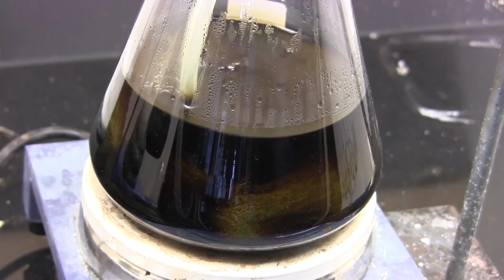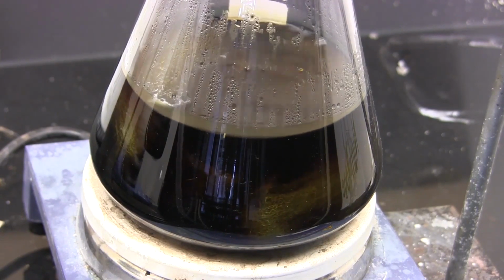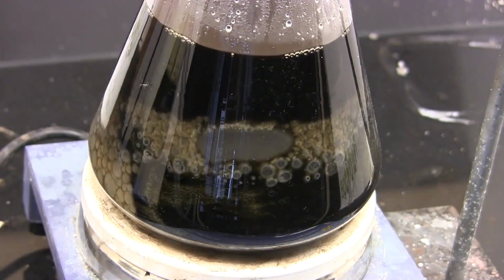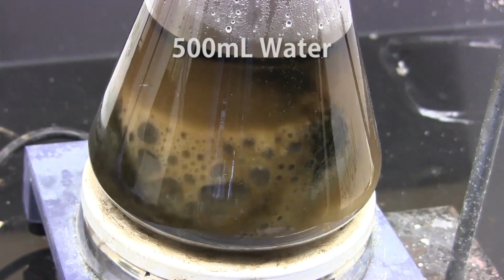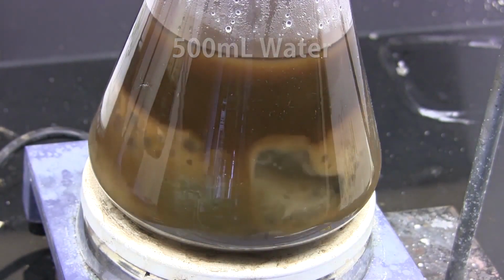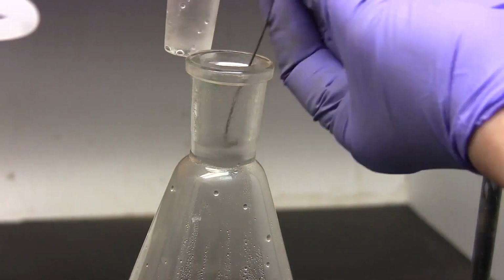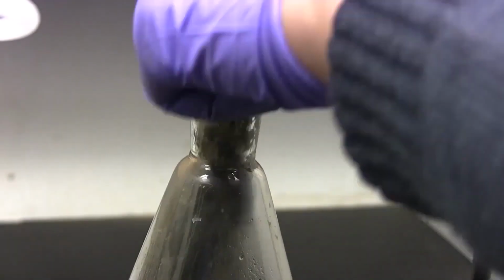Okay, all the chlorine has been added. Now we just let the mixture stir for an hour to complete the reaction, and then we let it cool completely to room temperature. Here we are after everything is at room temperature. Now we add 500 milliliters of water to dissolve the iron chlorides, any soluble impurities, as well as wash out any residual hydrogen chloride. Well, I forgot to remove the unreacted steel wool. You can use an iron wire hook to fish it out.